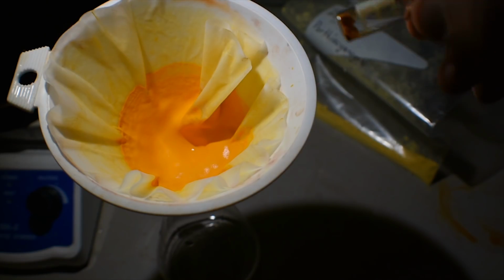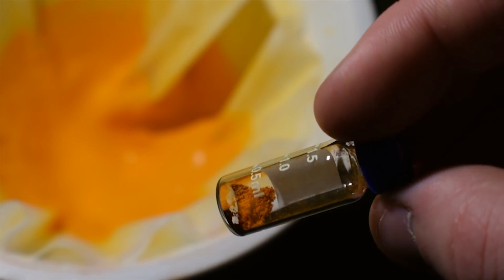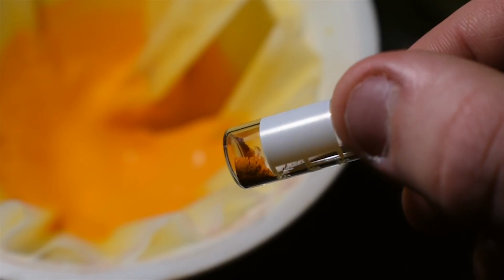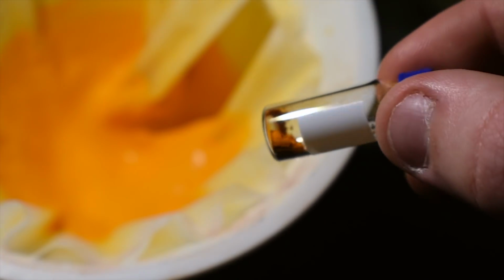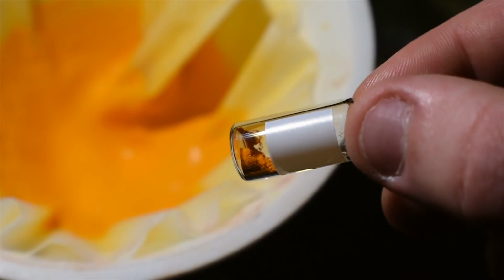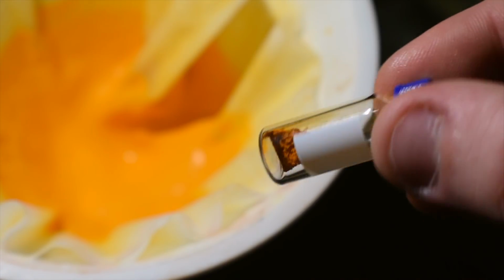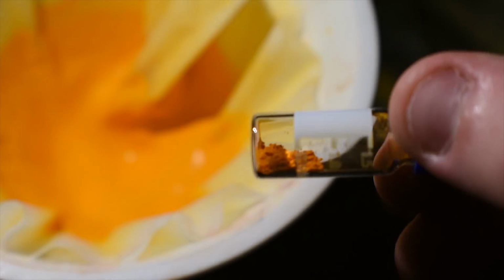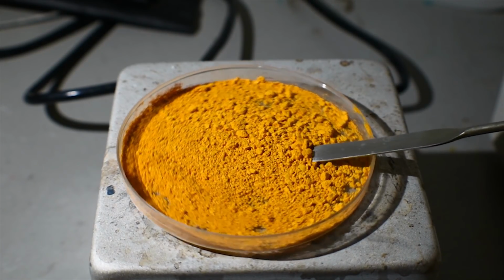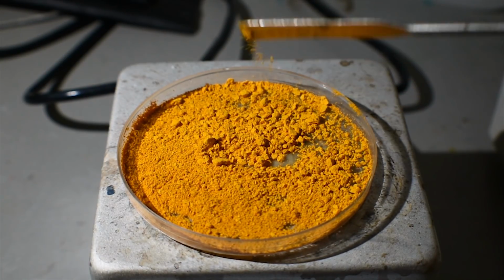You might not be able to see that very well, so let me get a little bit closer. There we go. This is perthiocyanogen formed by the reaction of chlorine with a thiocyanate solution. As you can see, it is pretty much the same color as that stuff down there, except this stuff is dry. It takes on a little bit darker of a color, but it's still perthiocyanogen as far as I know. At least I don't have any reason to doubt that it is. So here's the product. Some nice orange/yellow perthiocyanogen.